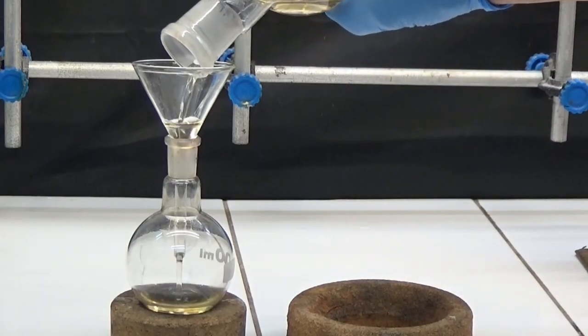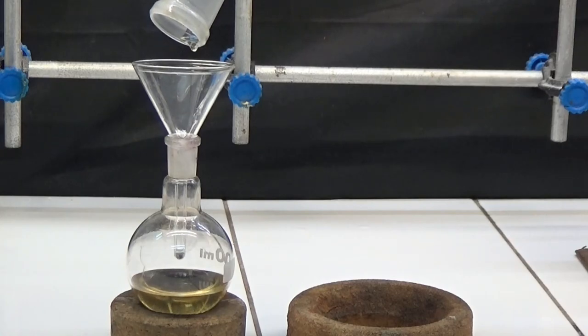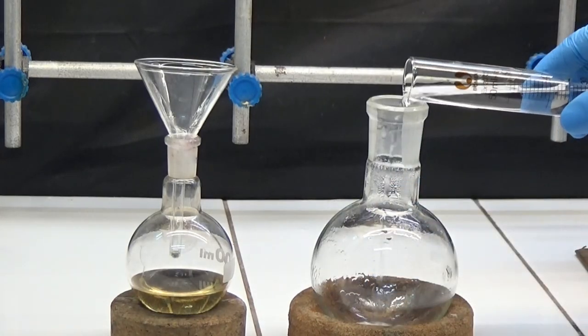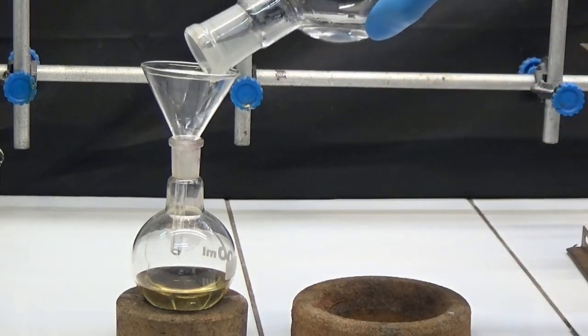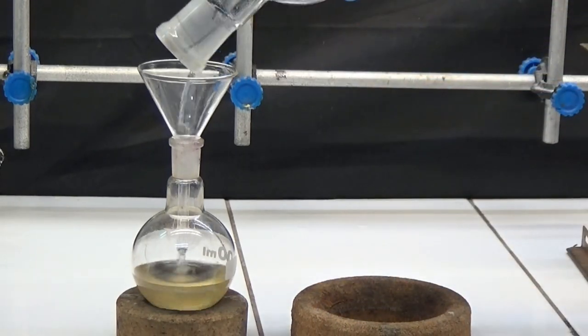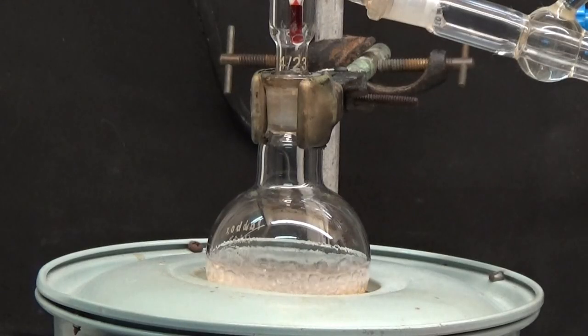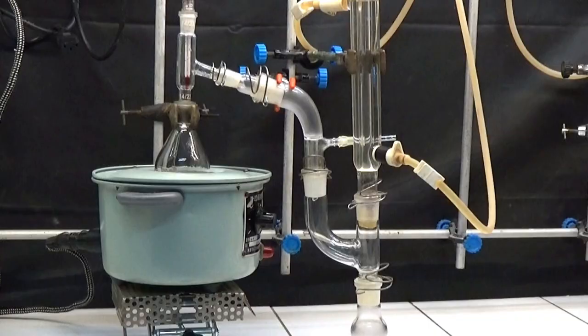Transfer to a 100 milliliters flask washing the 250 milliliters flask twice with 25 milliliters ethanol. Distill ethanol and continue with vacuum distillation.